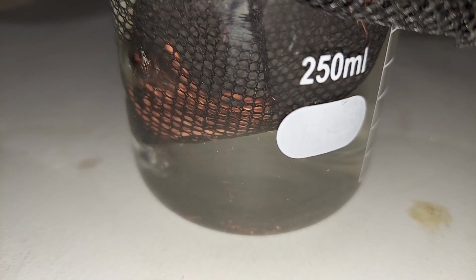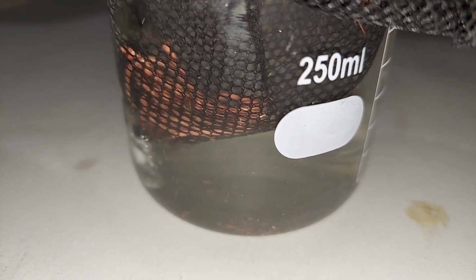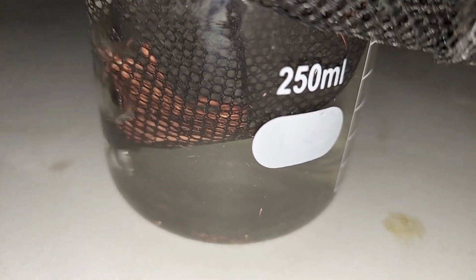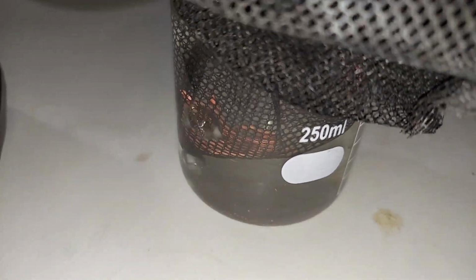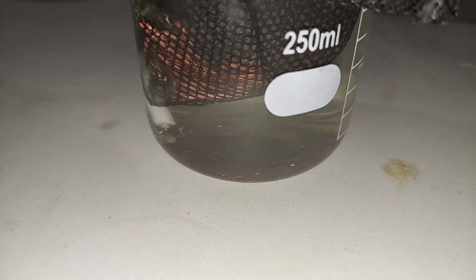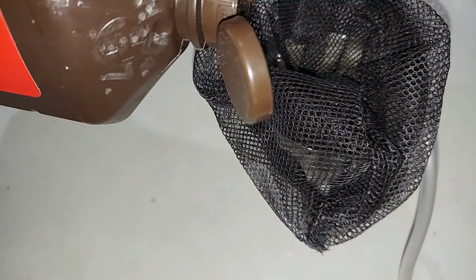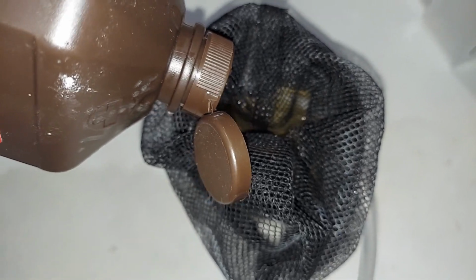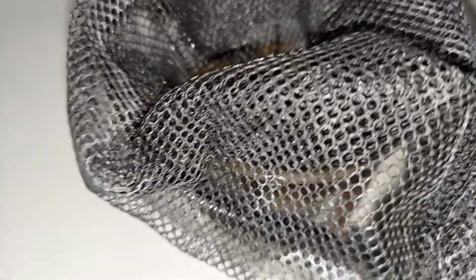We're at day 8 here. Things are going really well. Tiny bits of copper are floating everywhere, which is a great sign. And I am going to speed this up at this point a little bit by adding some hydrogen peroxide. We discussed that earlier, and I think it's time to do that, and then I'm just going to call it quits. Because there's an unknown amount of copper acetate in there, I'm just going to add some arbitrary amount of the hydrogen peroxide. This is 18% here. Not too much, just a little bit. We want some of the acetic acid always left behind to continue working while the peracetic acid is formed.